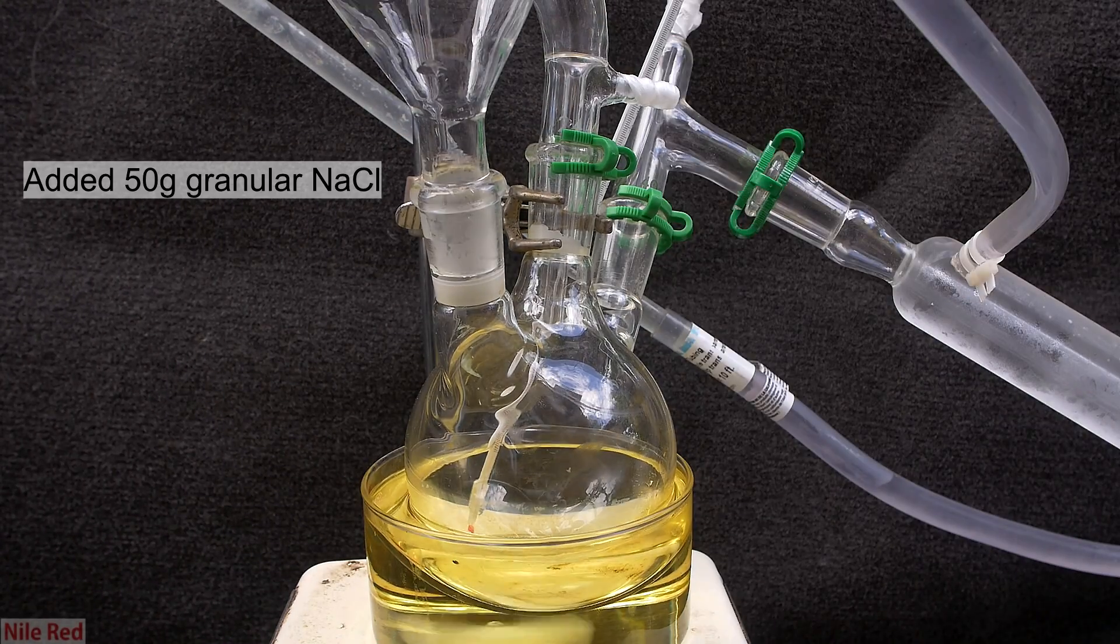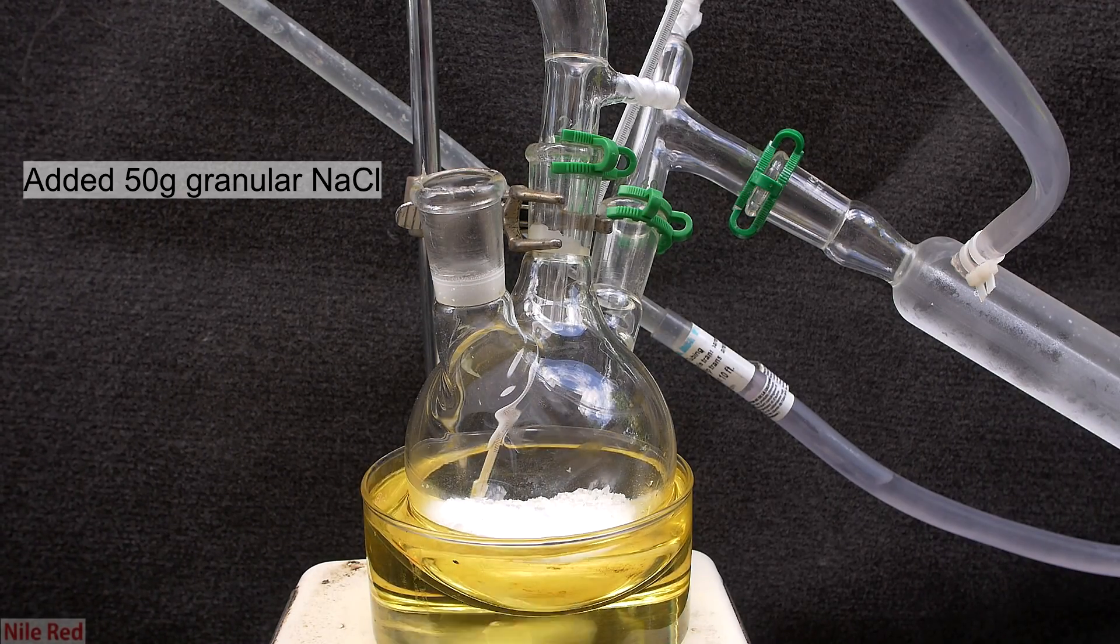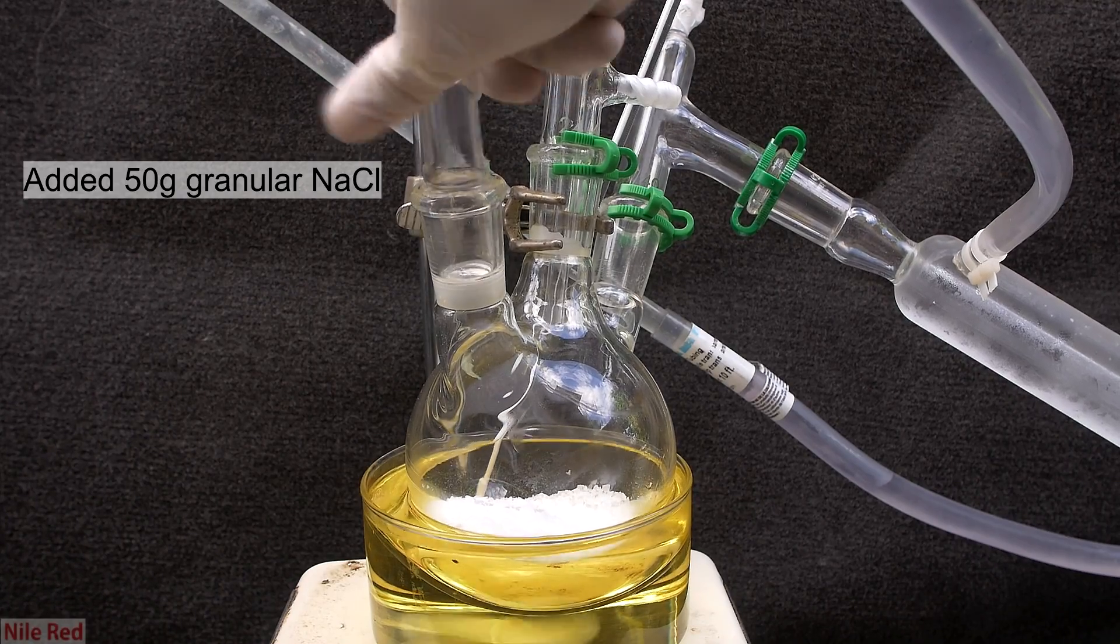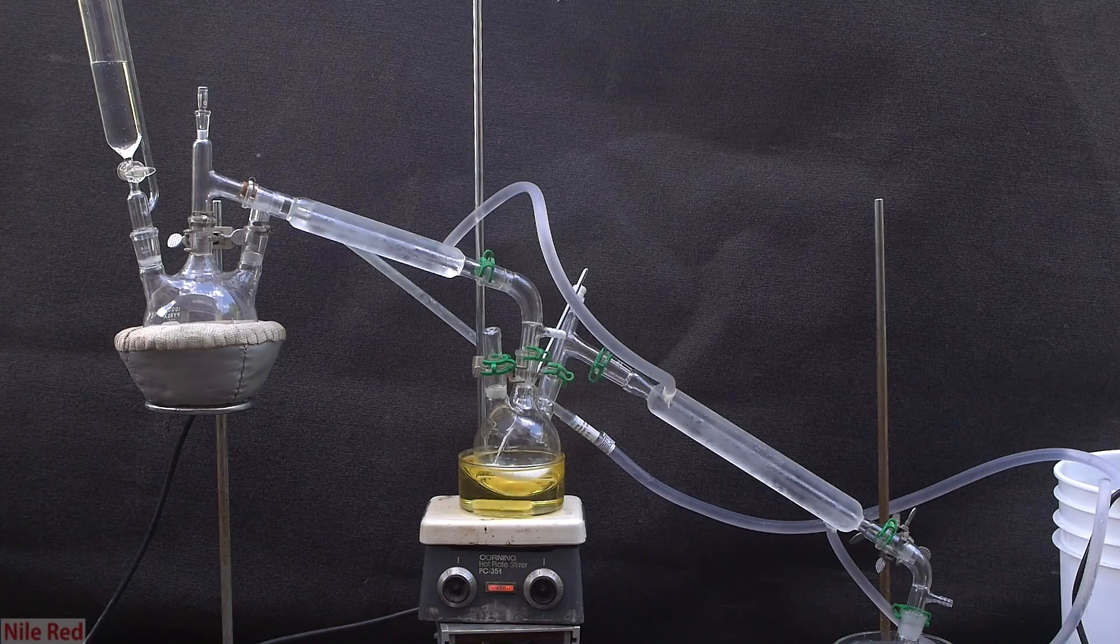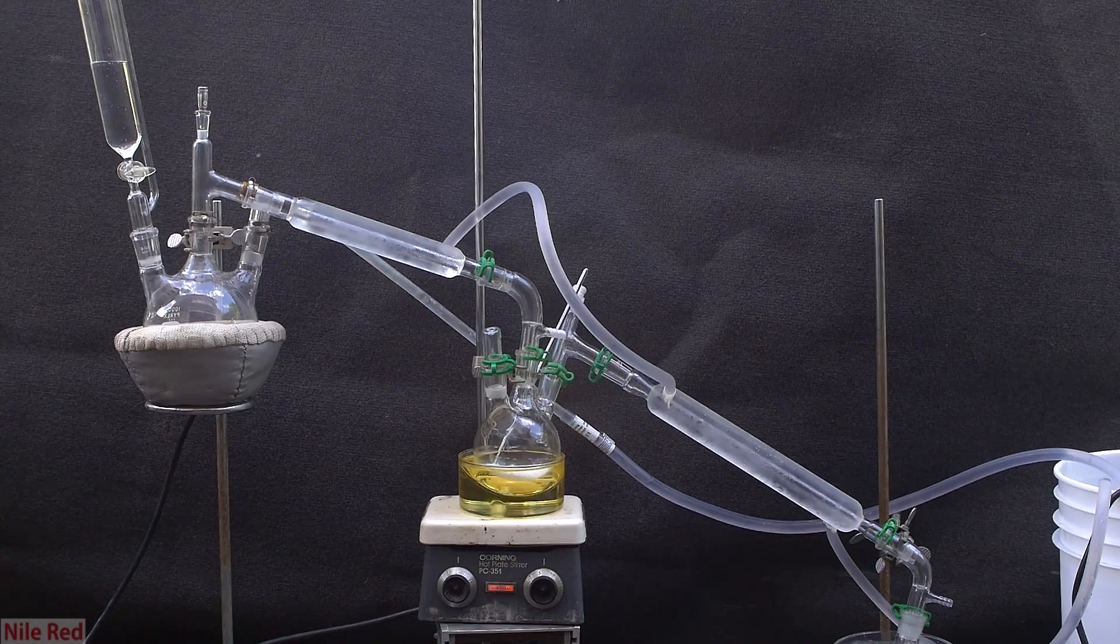To our middle flask that's sitting above the oil bath, I add about 50 grams of regular table salt. This is what the entire setup looks like prior to running it, and there's just one last thing we need to do.